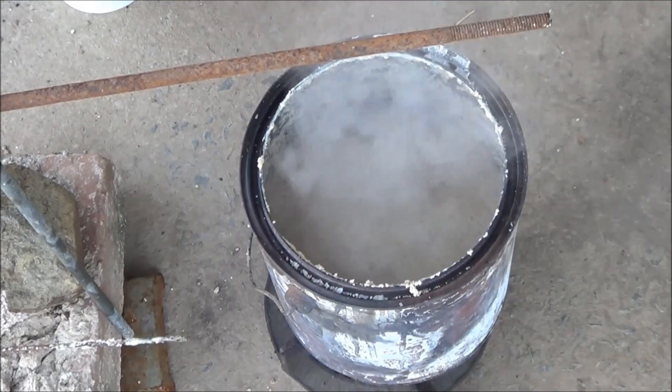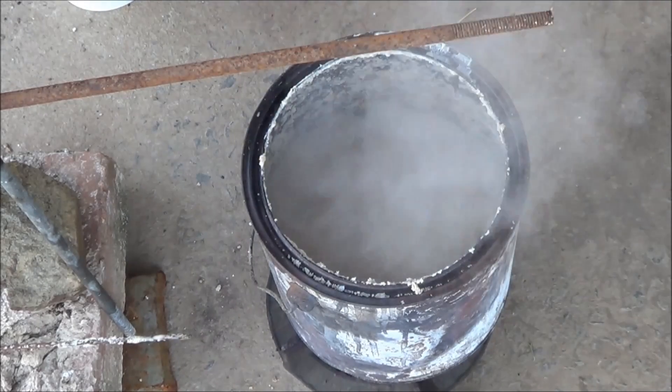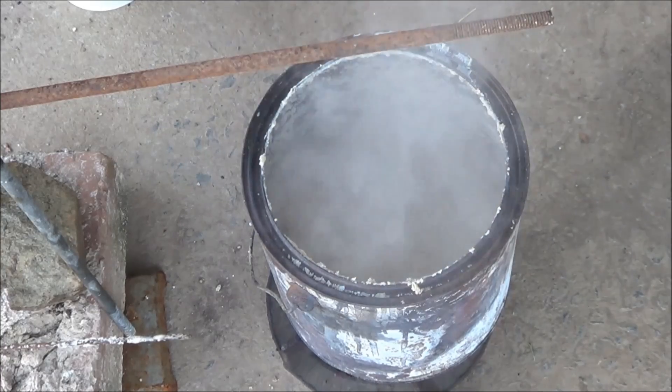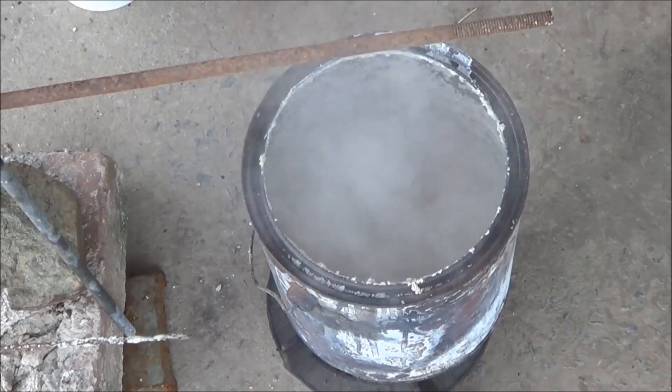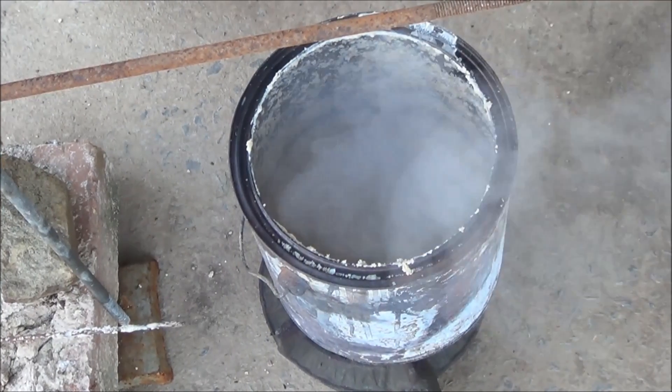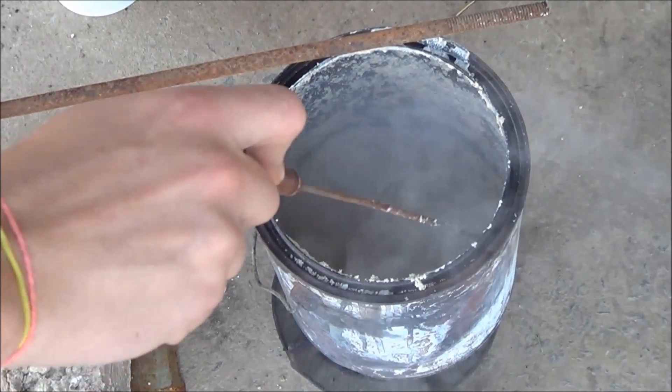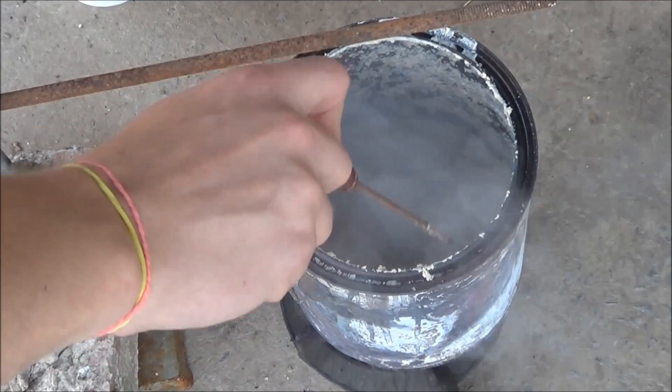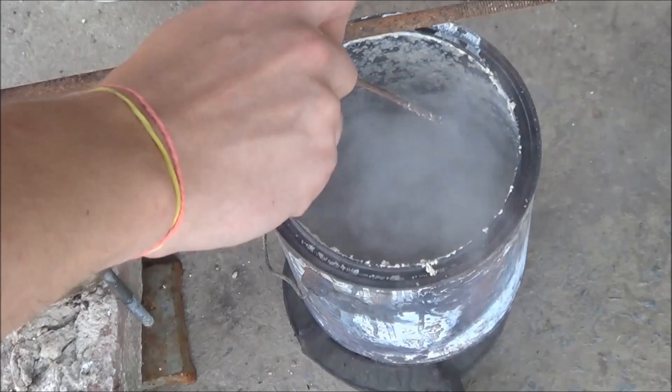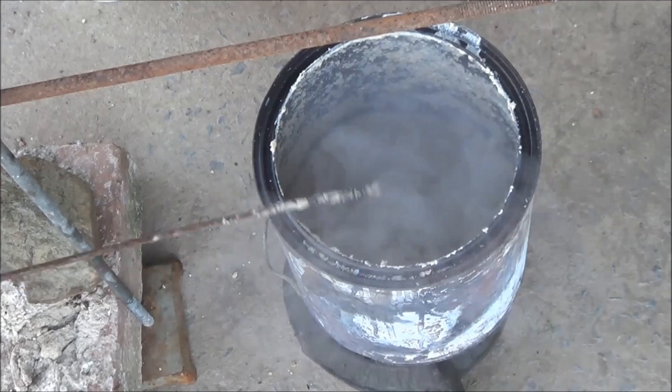Okay, we're an hour in and I think I'm going to have to evacuate my entire city. It's pretty bad. It's actually not overwhelming but I just hate any presence of ammonia around. It's just not my thing. Okay, we're an hour and 10 minutes into it and we're still producing a lot of gas but it looks like it is definitely starting to solidify down at the bottom there, which is great. We're nearly done.